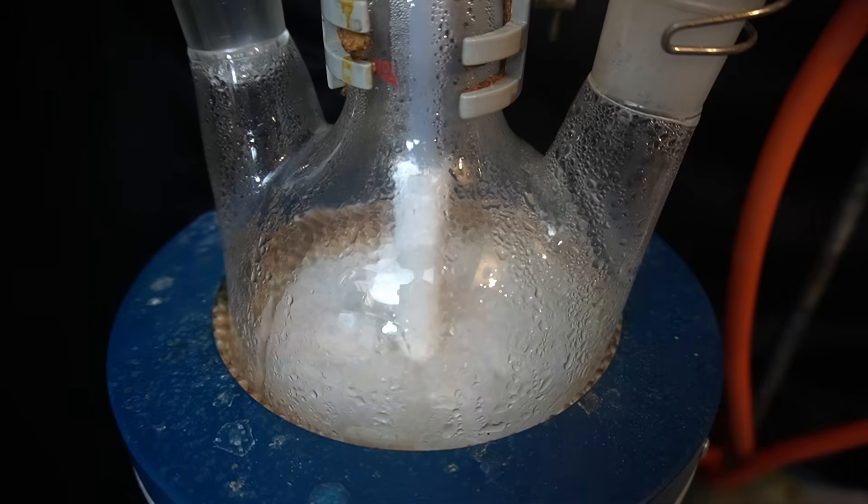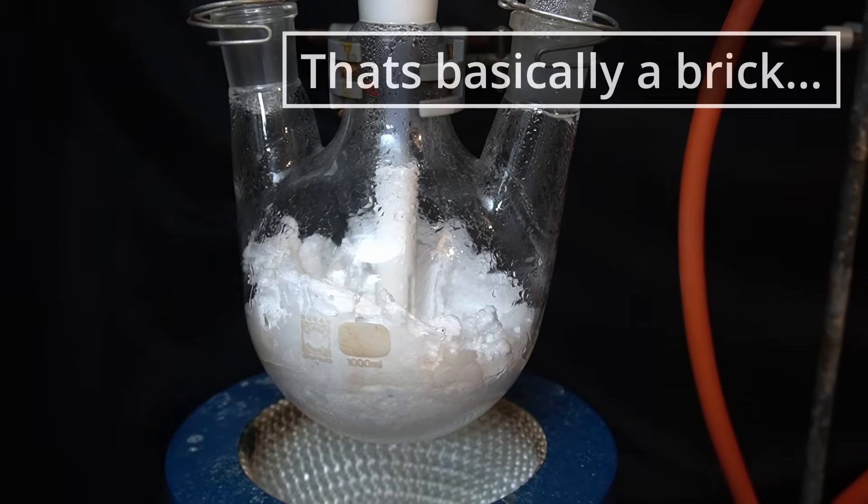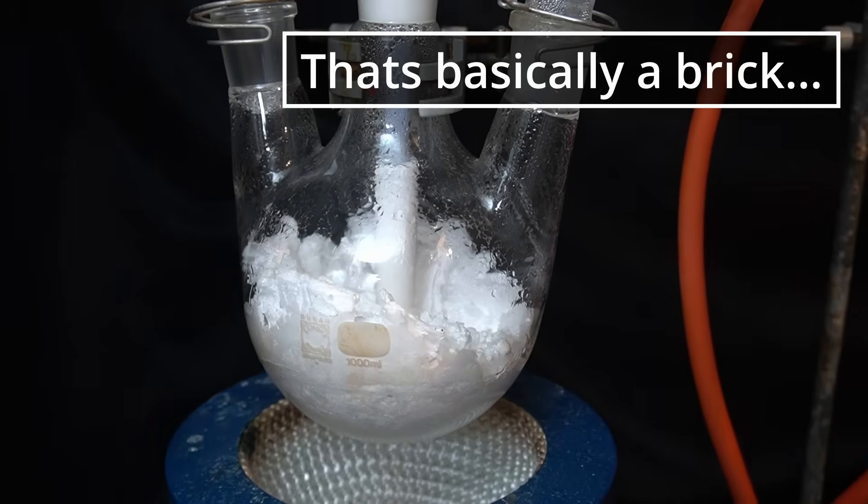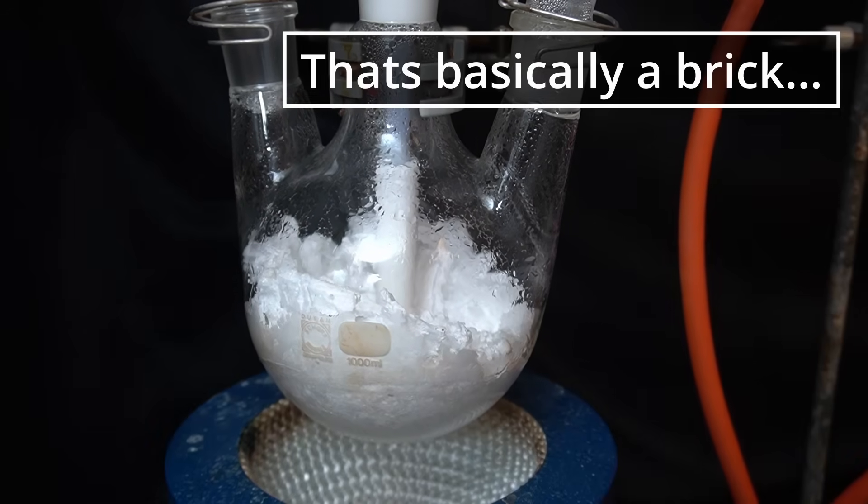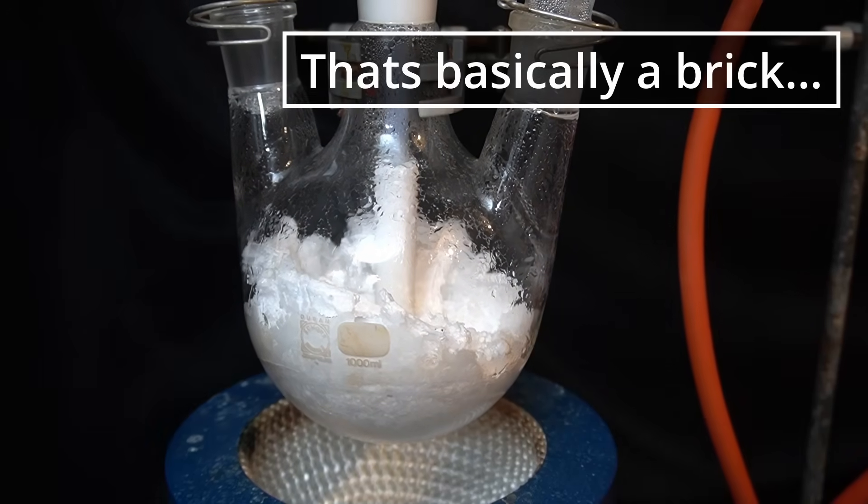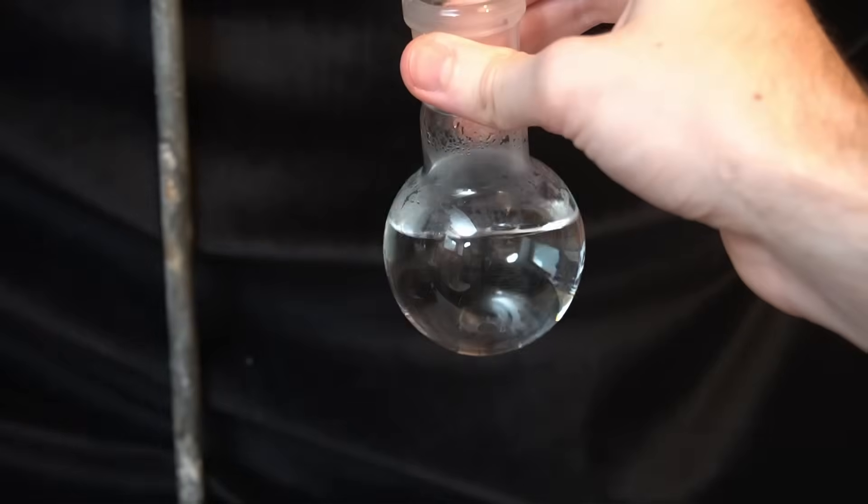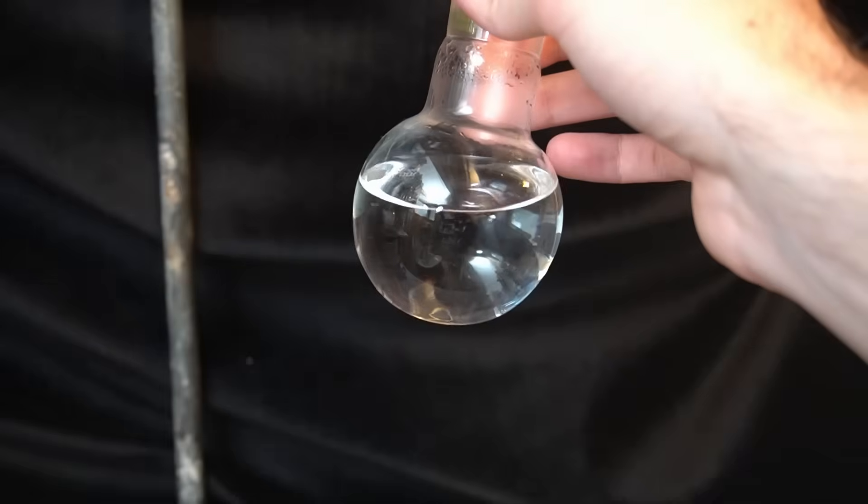Even a mechanical stirrer can't mix this, and it actually deformed from the high stress and temperatures, but I managed to straighten it out again, so all is good. In total, I removed about 80 ml of water, which is around 50%, but I can't get any further like this.